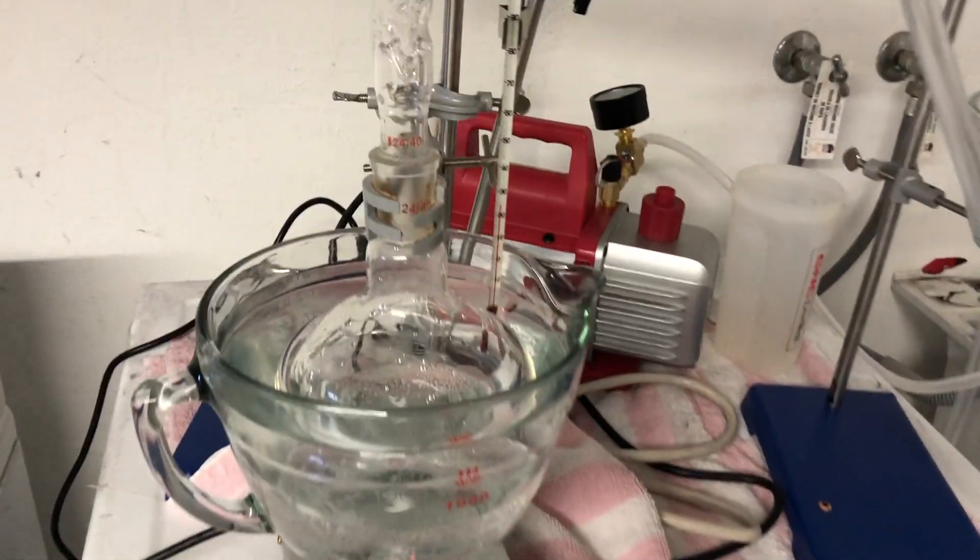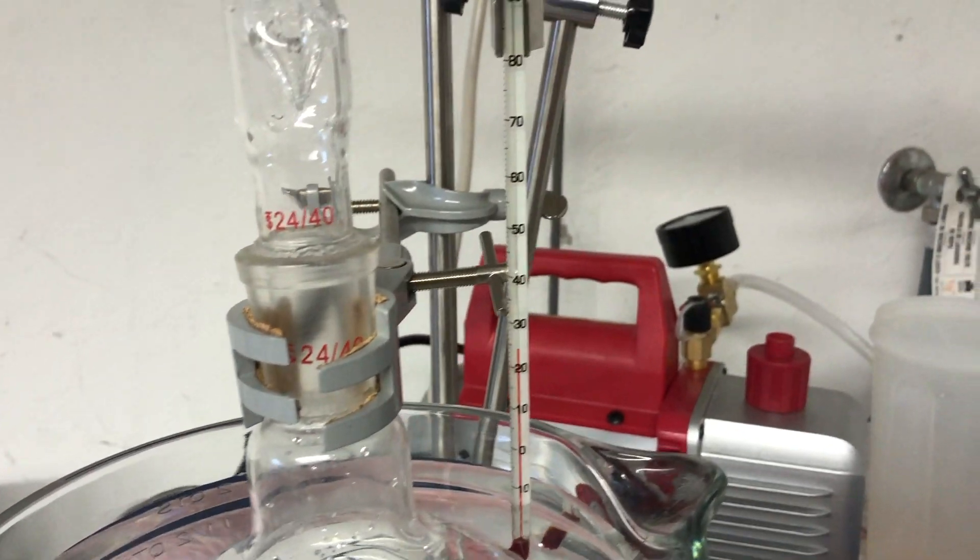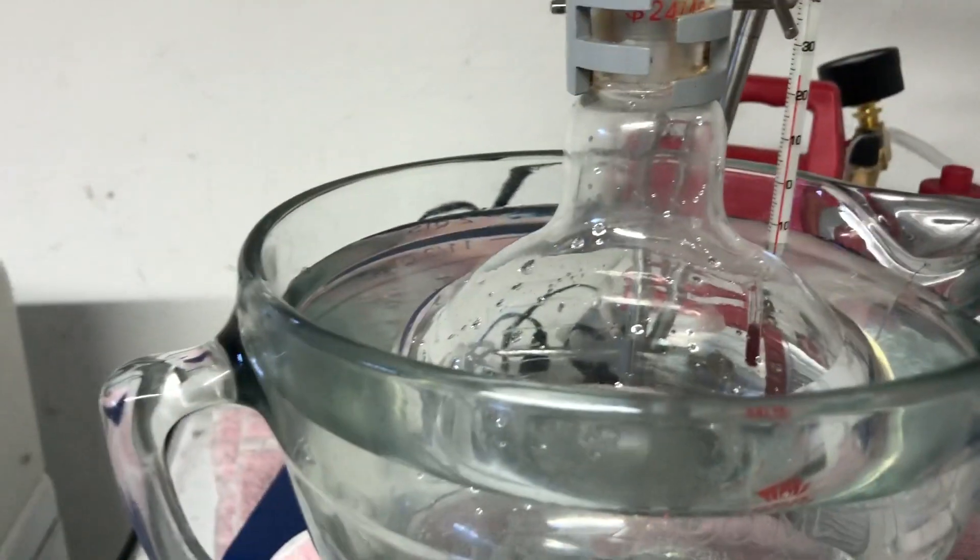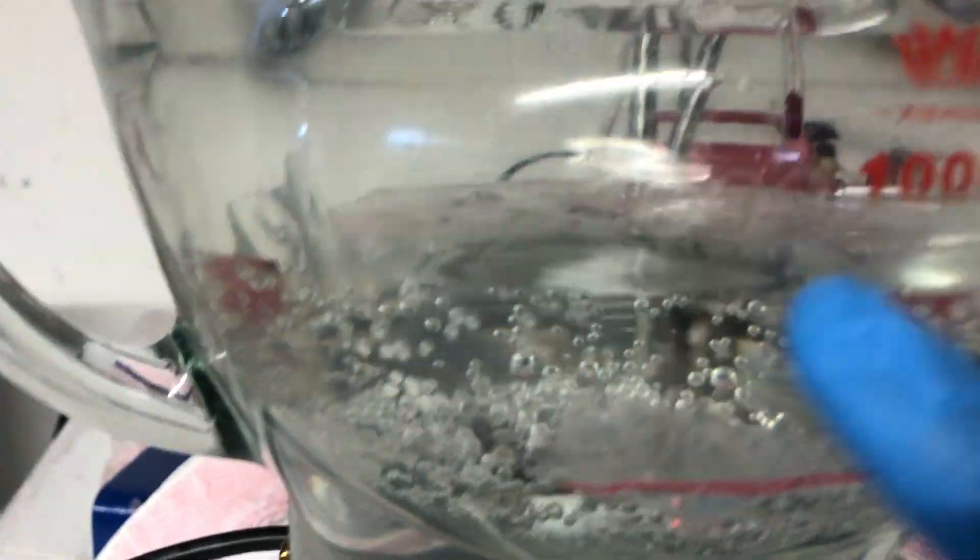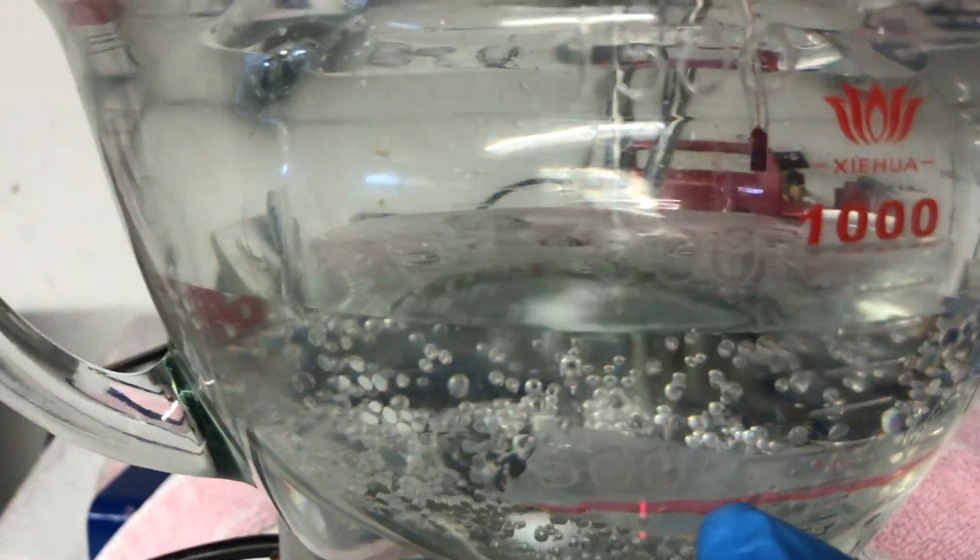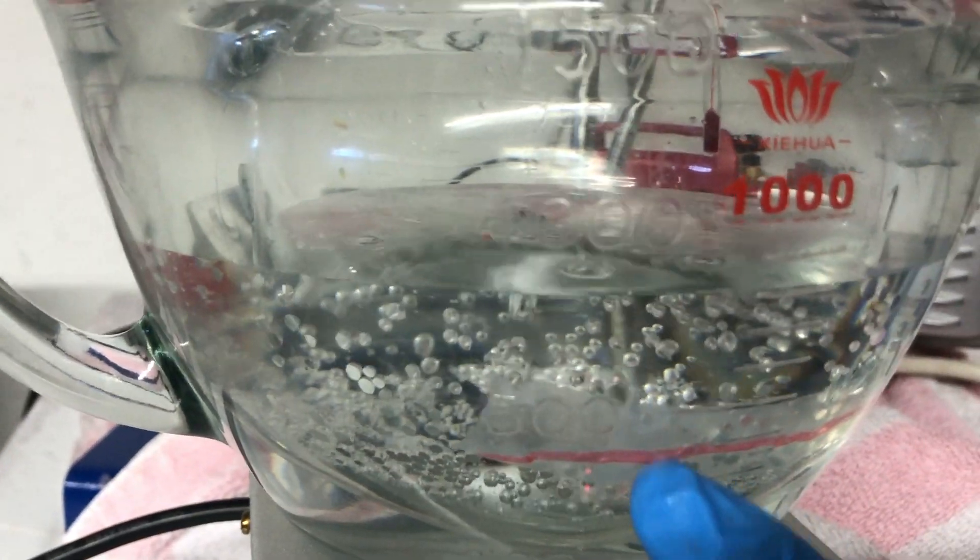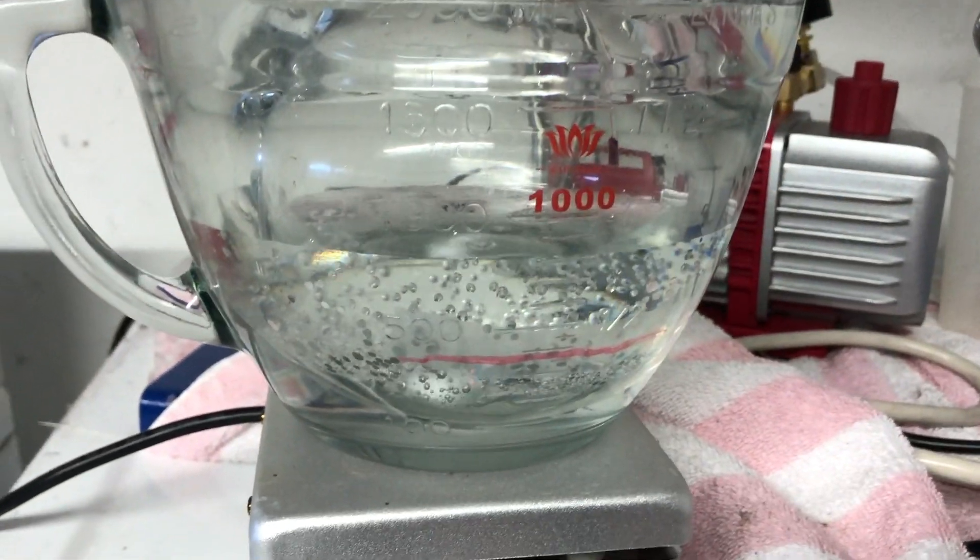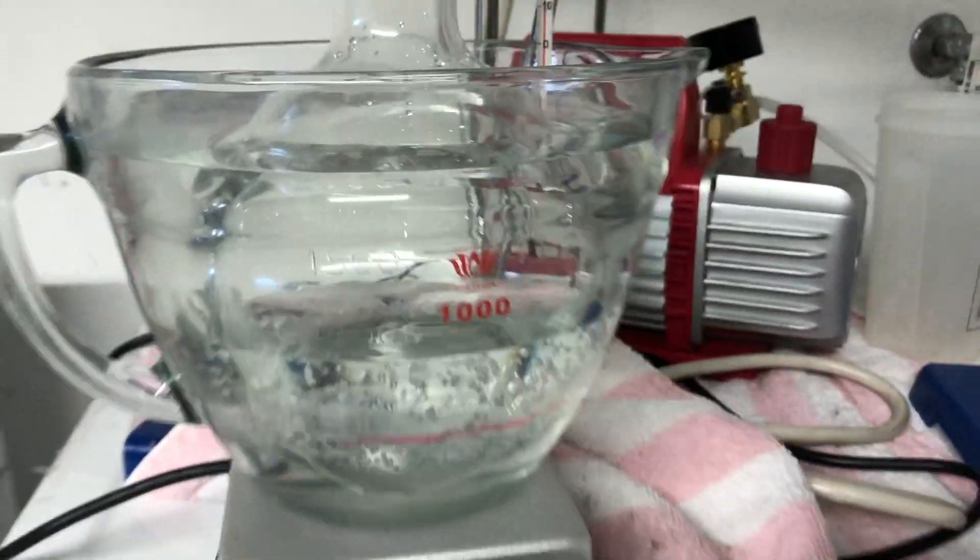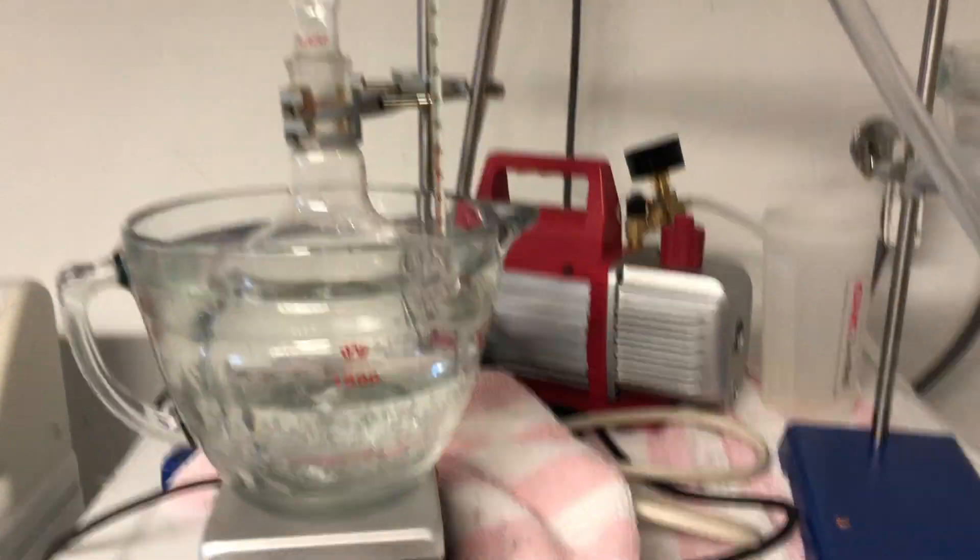We're gonna heat up. We're gonna turn down the heat. About 55. It's gonna be a few hours. We're gonna try to pull that water there down to there. And then we'll have some pretty high-concentrated hydrogen peroxide. Let's let that go.